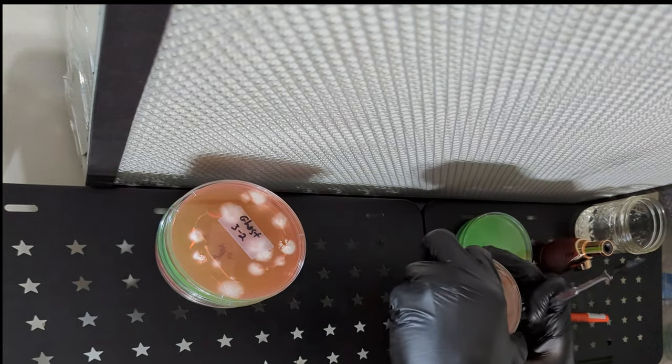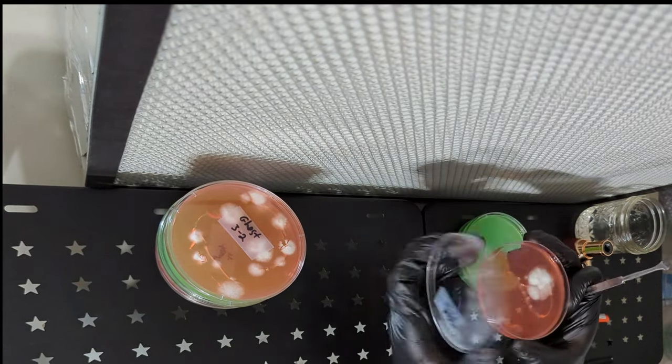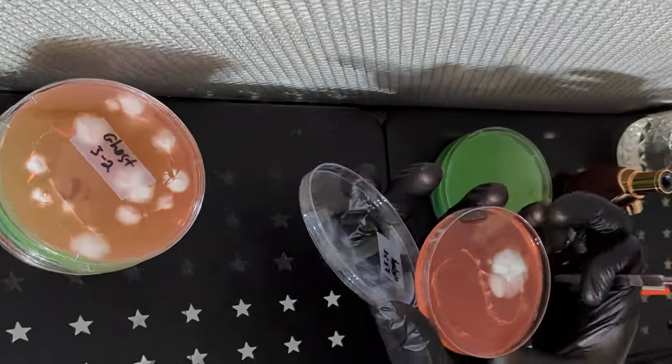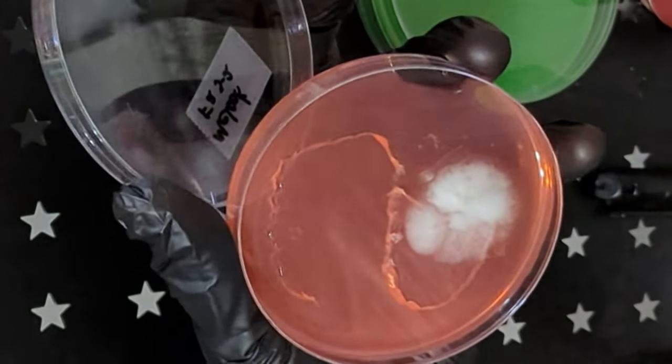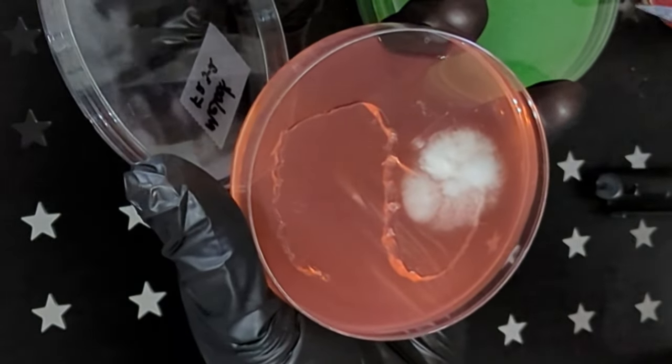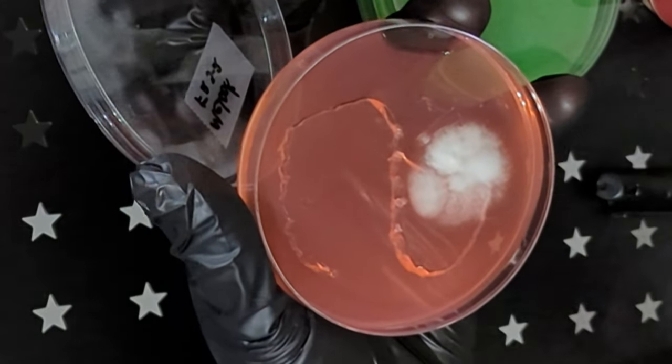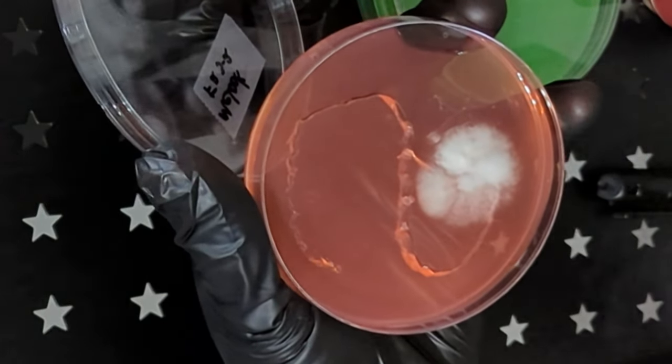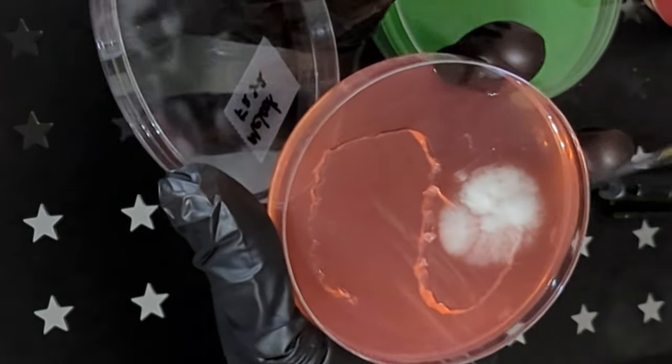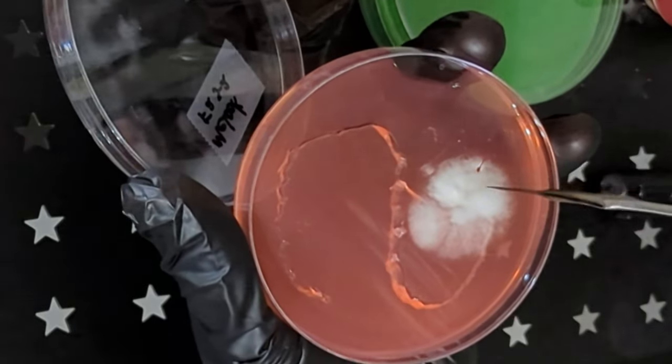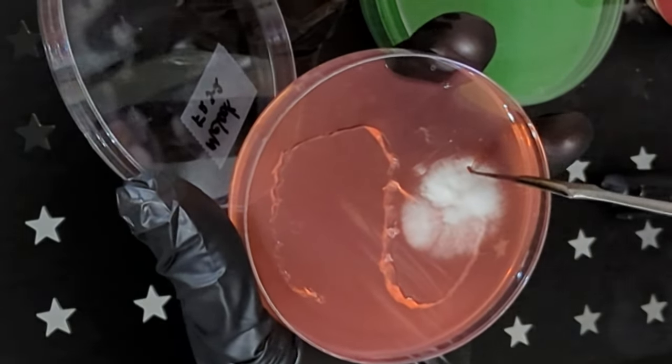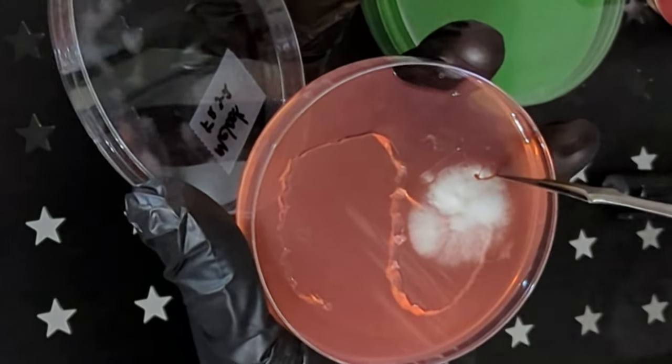This isn't everything there is to know about working with agar, but everything I could think of at the point that I made this video. There's tons more information and all kinds of variation in technique and tools. I would encourage you to seek out more information as well as reading any anecdotes available online. Everyone's situation, lab, and environment is different. What works for one person might not work for someone else in their specific situation.